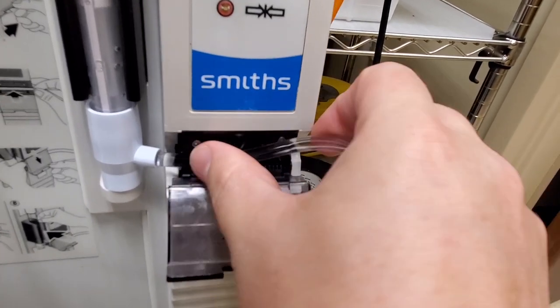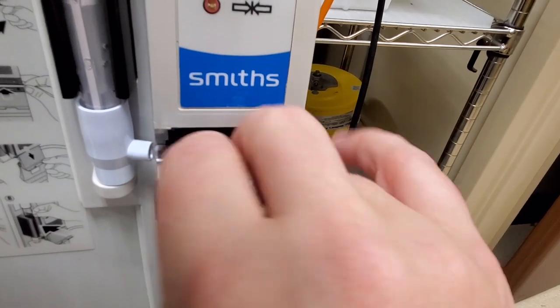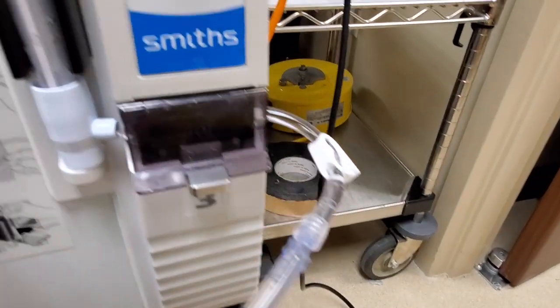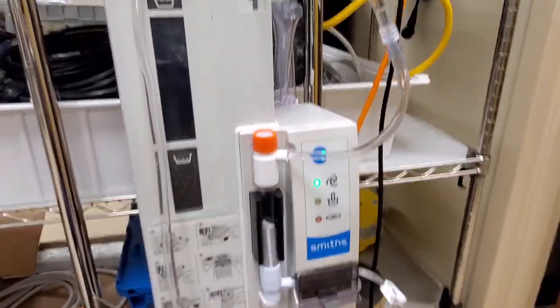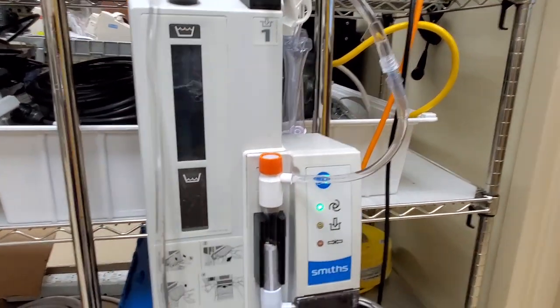Down here, load your hose into the pinch valve. Just make sure it's up and in there really good. Latch the door. There you go. And it will show you a green light. You're good to go. Ready to start. So these are a water reservoir heater.